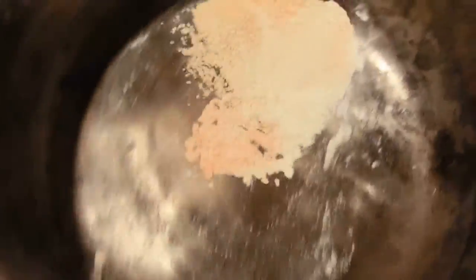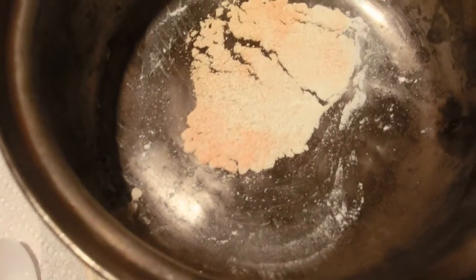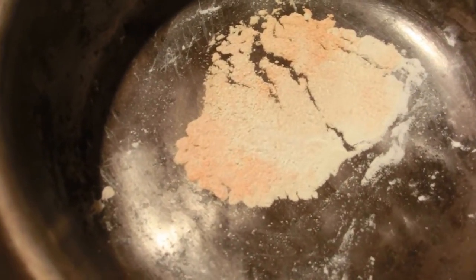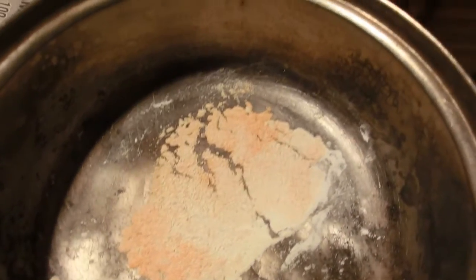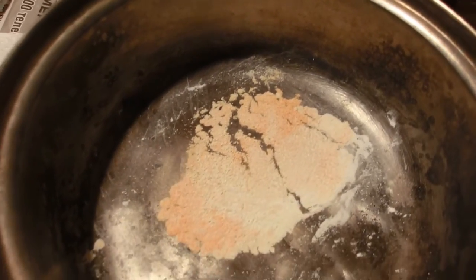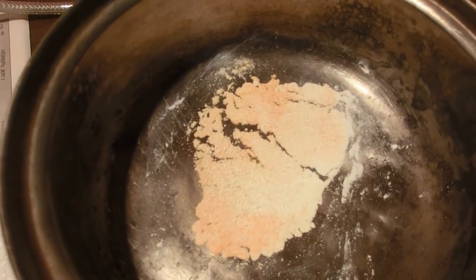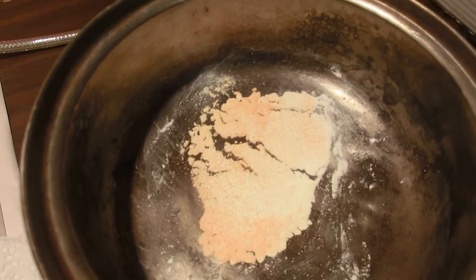And as I move it around a little more, you can see the color is there. So I'll keep doing this until this turns a bright orange or reddish color.